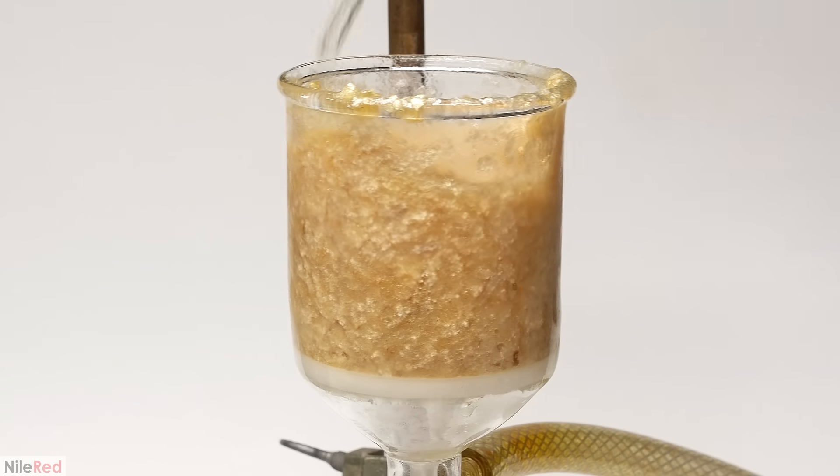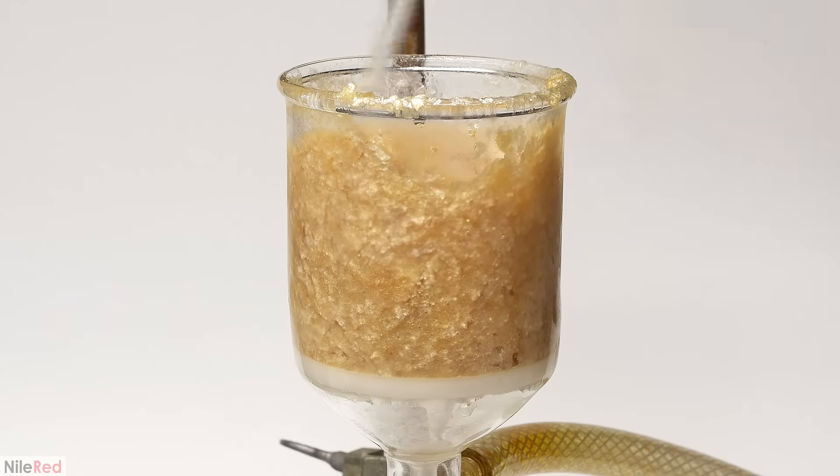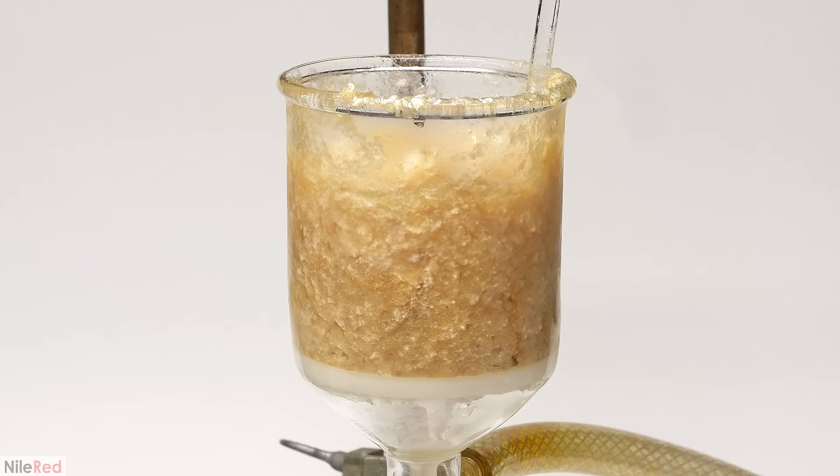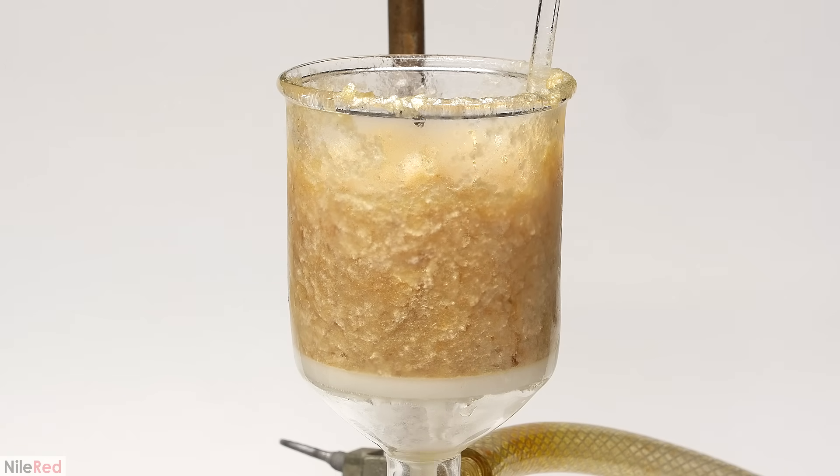Then, I leave the pump on for several minutes to dry things up as much as possible. What's really nice is that from this point on, the prep is much more pleasant because the urea nitrate I have here is practically odorless.